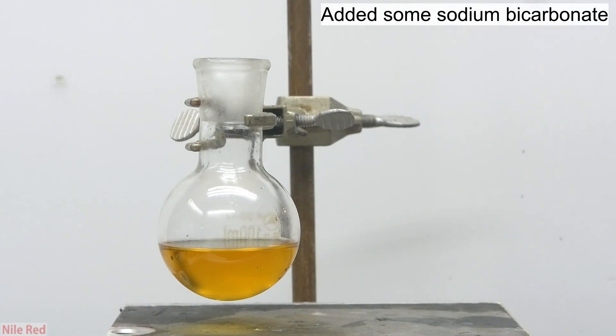After removing the water, I dumped in a bunch of sodium bicarbonate to get rid of any acid that might be present. I swirled the flask around a bit to mix it, and then I let it sit for a little while before I filtered it.